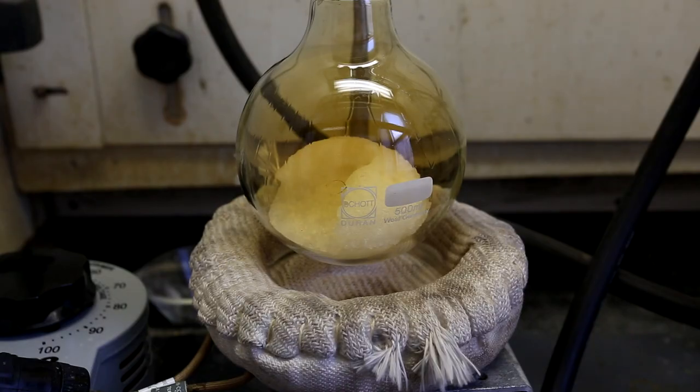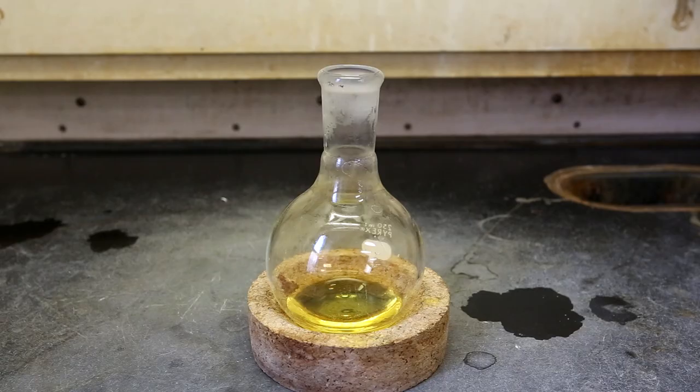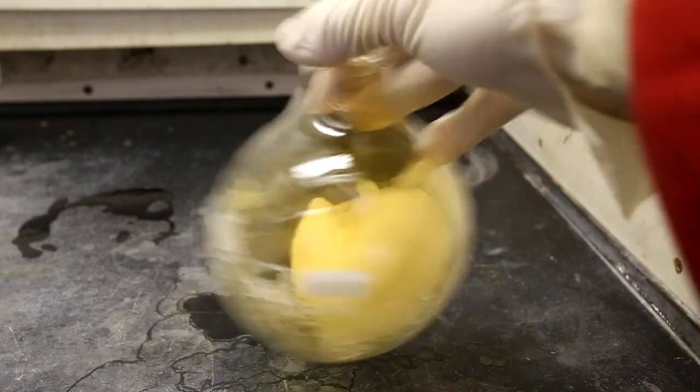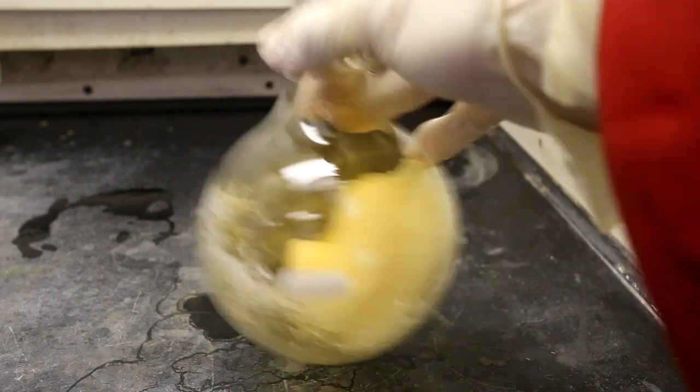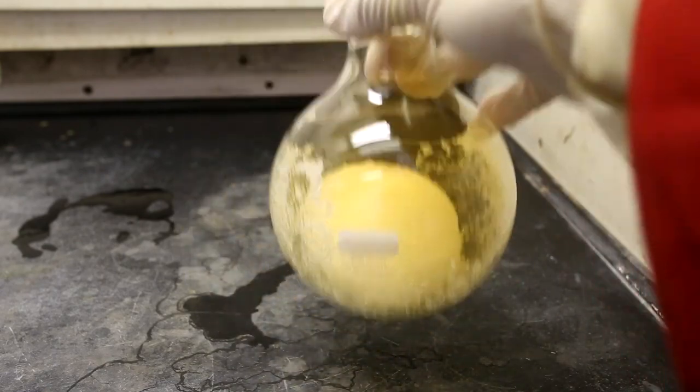At this point, you should remove the flask from heat and let it cool to room temperature before disposing of it. The final product is about 30 milliliters of highly concentrated yellow nitric acid. In the distillation flask, you are left with a big clump of hard sulfate salt.